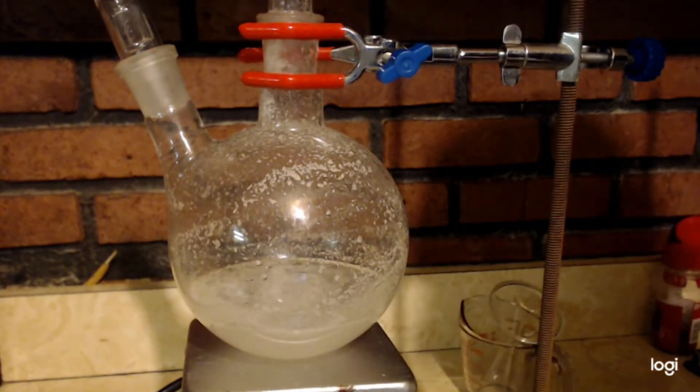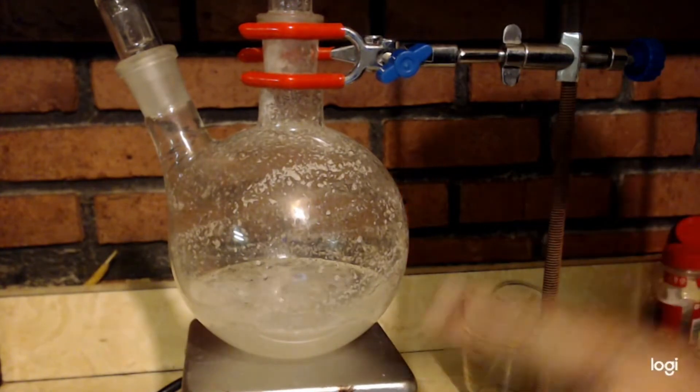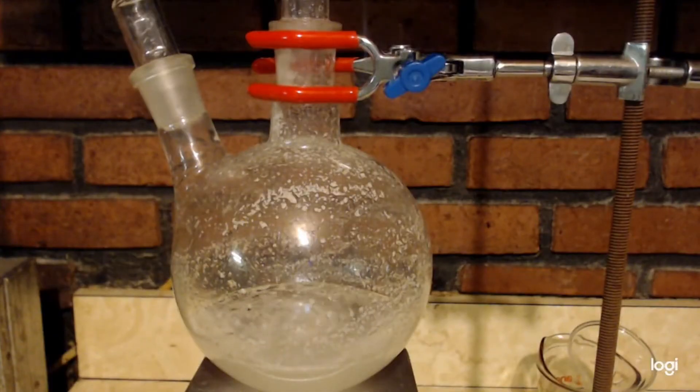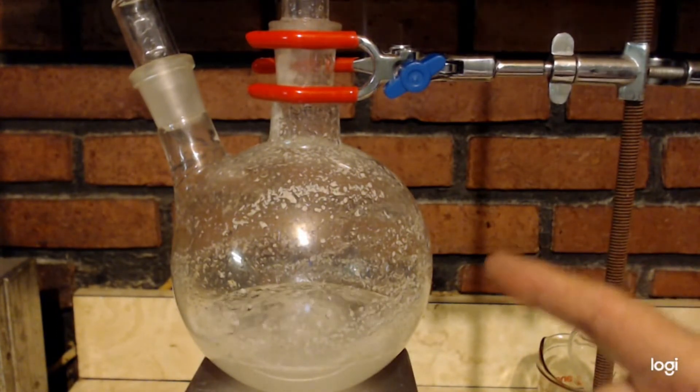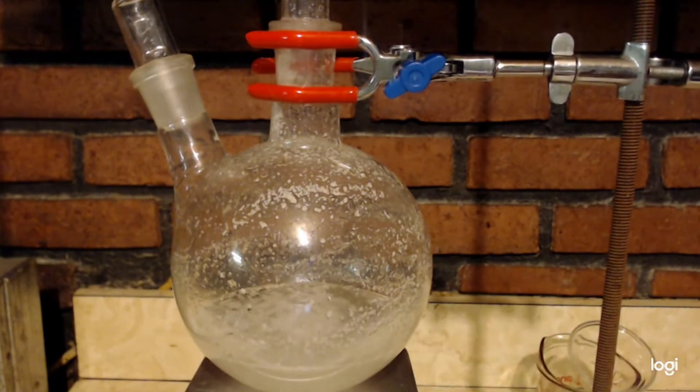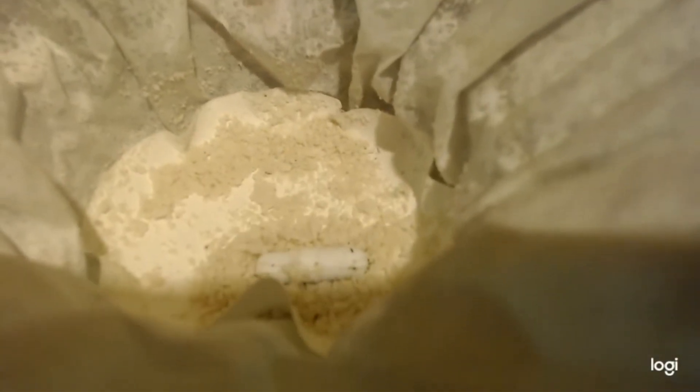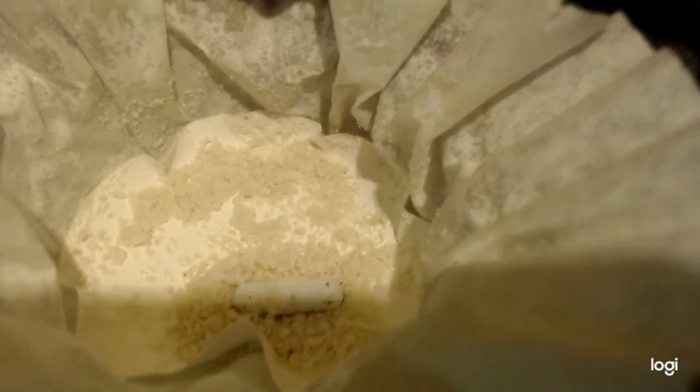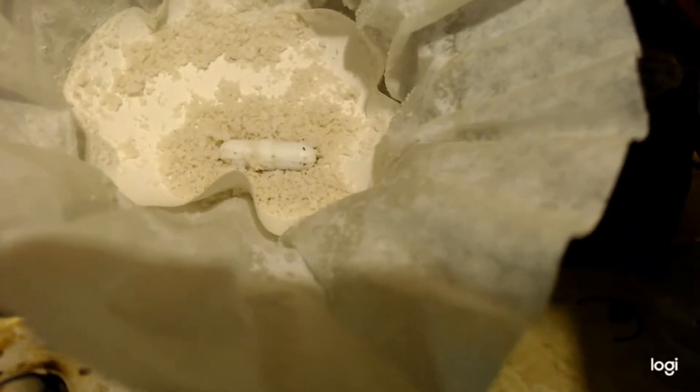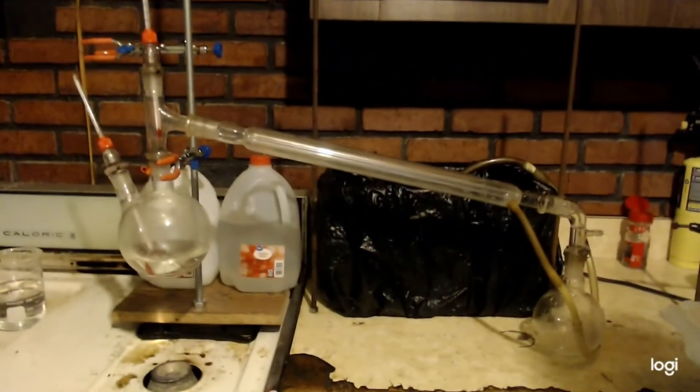And then I'll filter this out and that should make up for this loss. Hopefully by doing that, I will have 70 grams of hexamine in the pot when I'm done. Keep in mind at room temperature, 85.3 grams goes into 100 milliliters of water. I only have 70 grams instead of 85.3 grams. So it should be enough to have everything dissolve in there. There's what I filtered it out. You can see it's wax and who knows what else. A little bit of contaminants there.